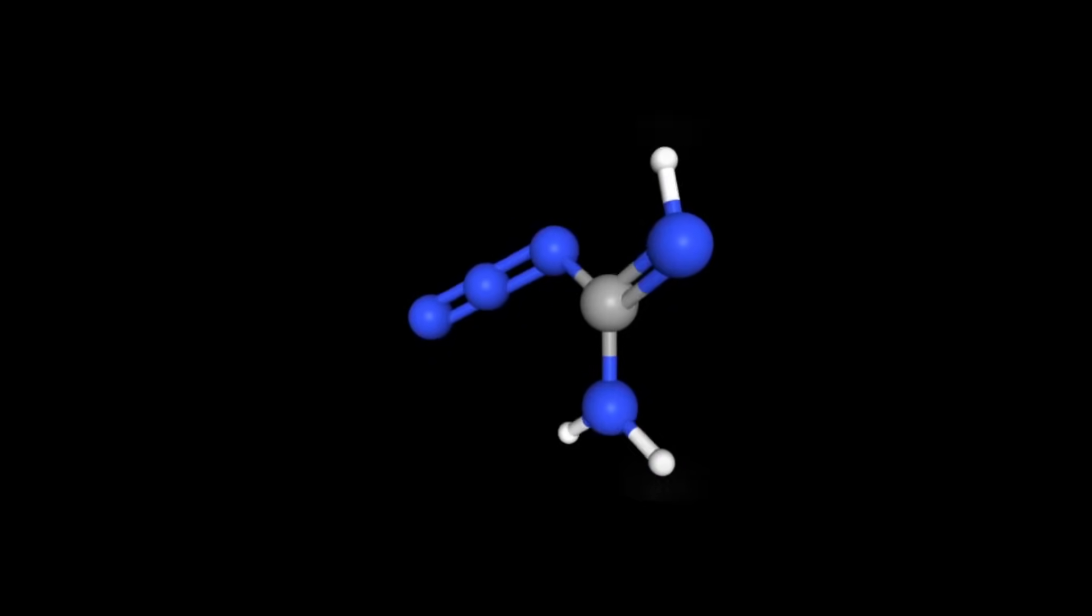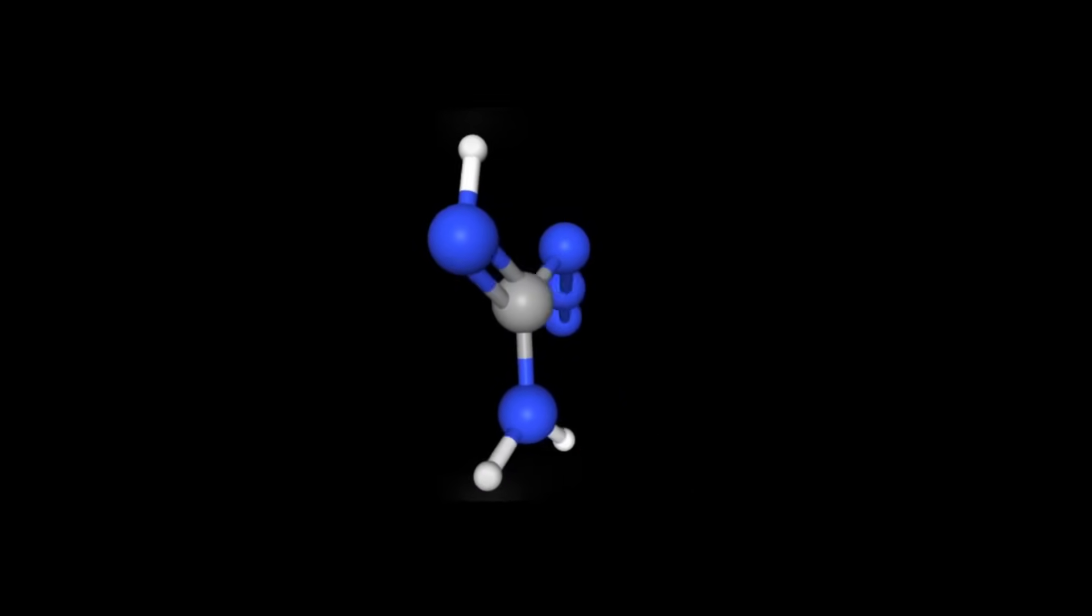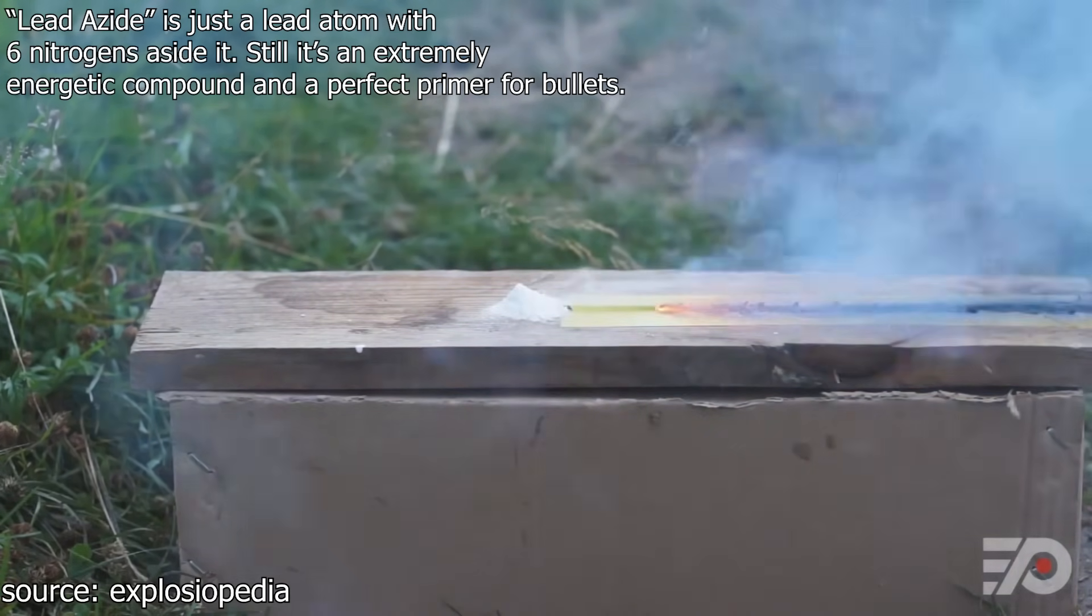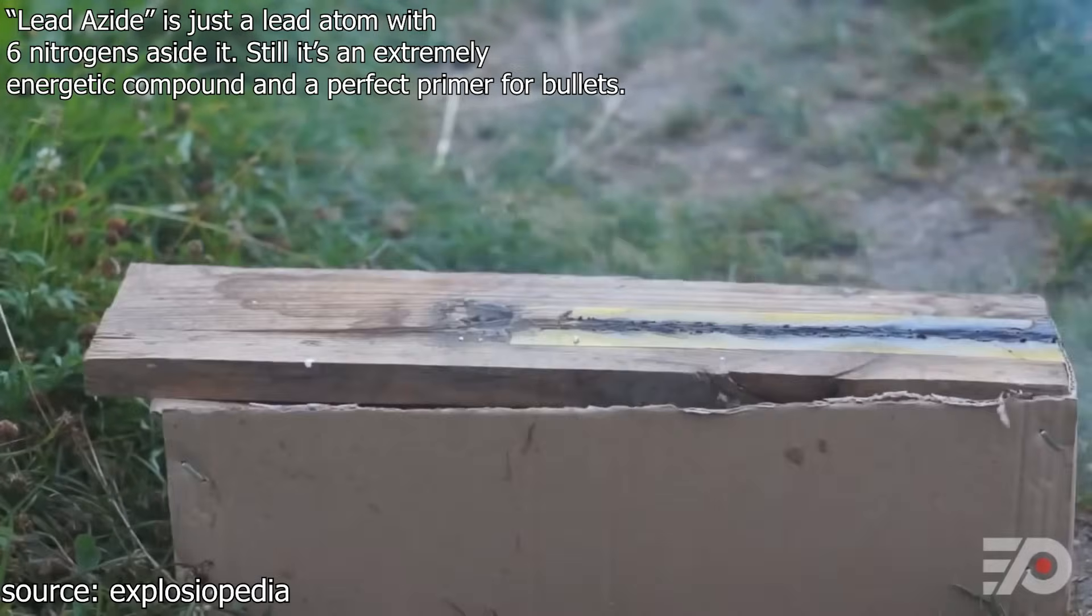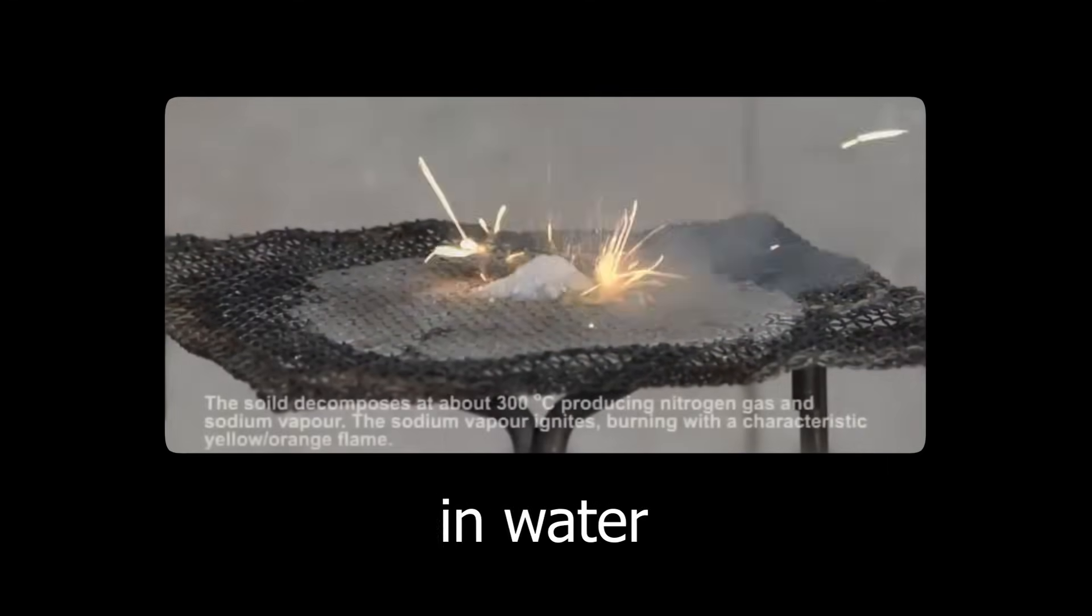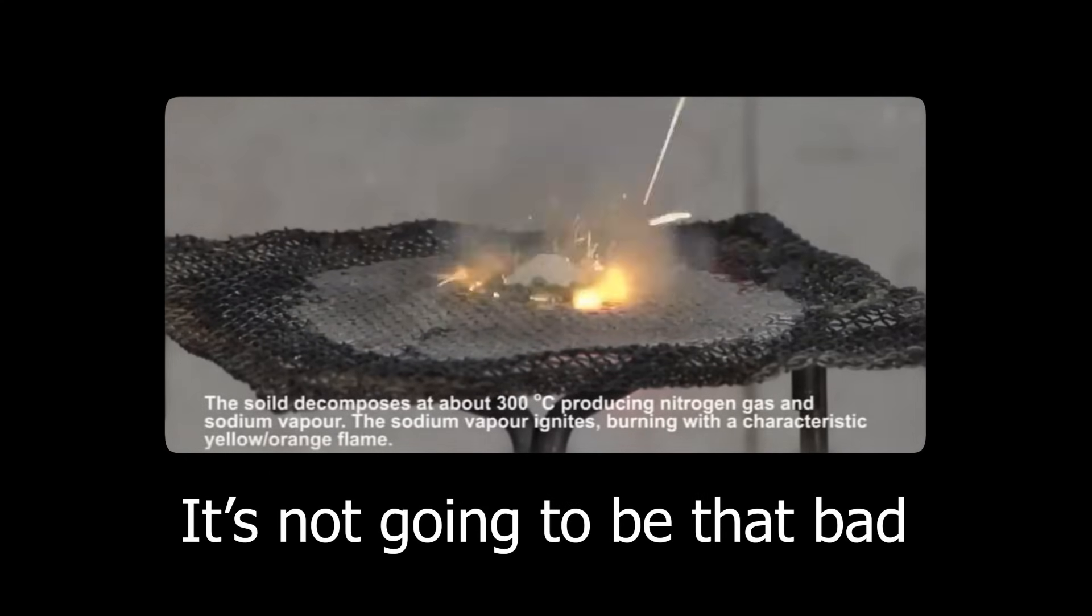Anyway, for the next step, and the second to last step, the paper entails that we make an azide intermediate. For those who aren't that into chemistry, an azide is an extremely dangerous ion to be around, since it's usually really explosive. However, because the azide is just an intermediate and is going to be dissolved in water, it's not going to be that bad.